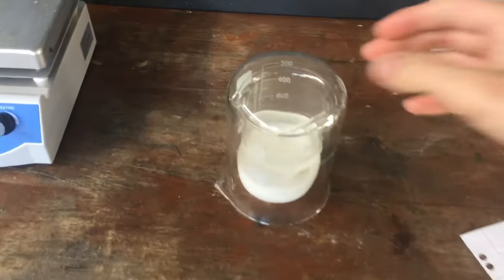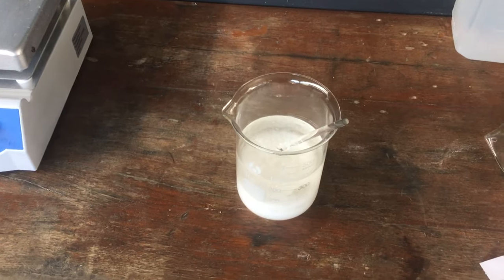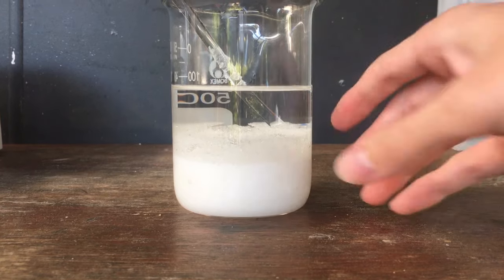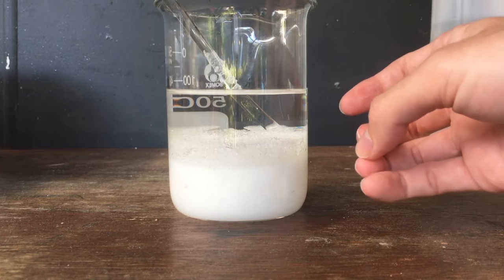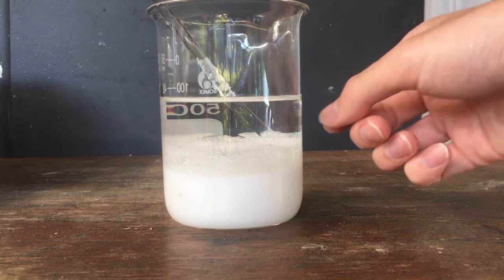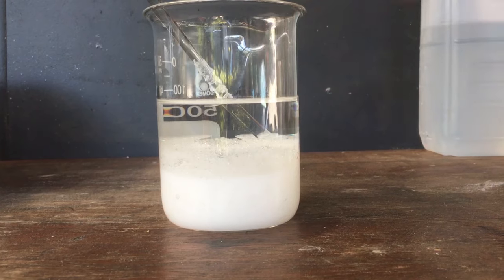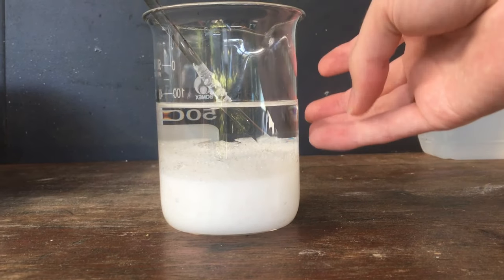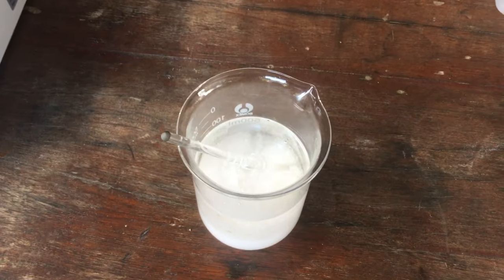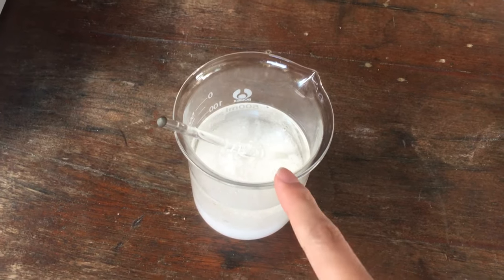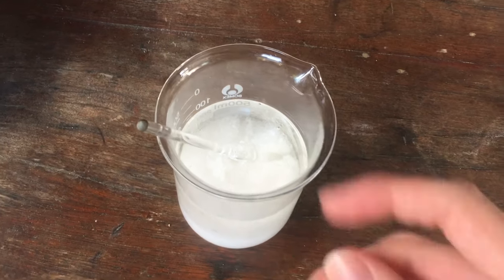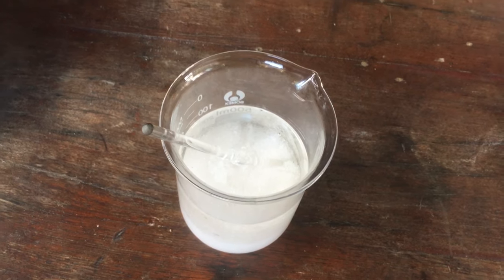After allowing the solution to cool, you can see we have a significant quantity of sodium chlorate crystals in our beaker. I didn't really want this whole quantity to crystallize out all in one go. I was saying before that if we have all of this crystallizing out at once, it does trap quite a significant quantity of our actual solution, which isn't ideal because that'll trap some of the chloride that we don't actually want to extract. But I think we can probably work with this. I will first decant the top layer of water and then maybe try to drain the solution from the rest of the crystals. Maybe I'll have to filter it and then I'll possibly have to wash it with a bit of ice-cold water.